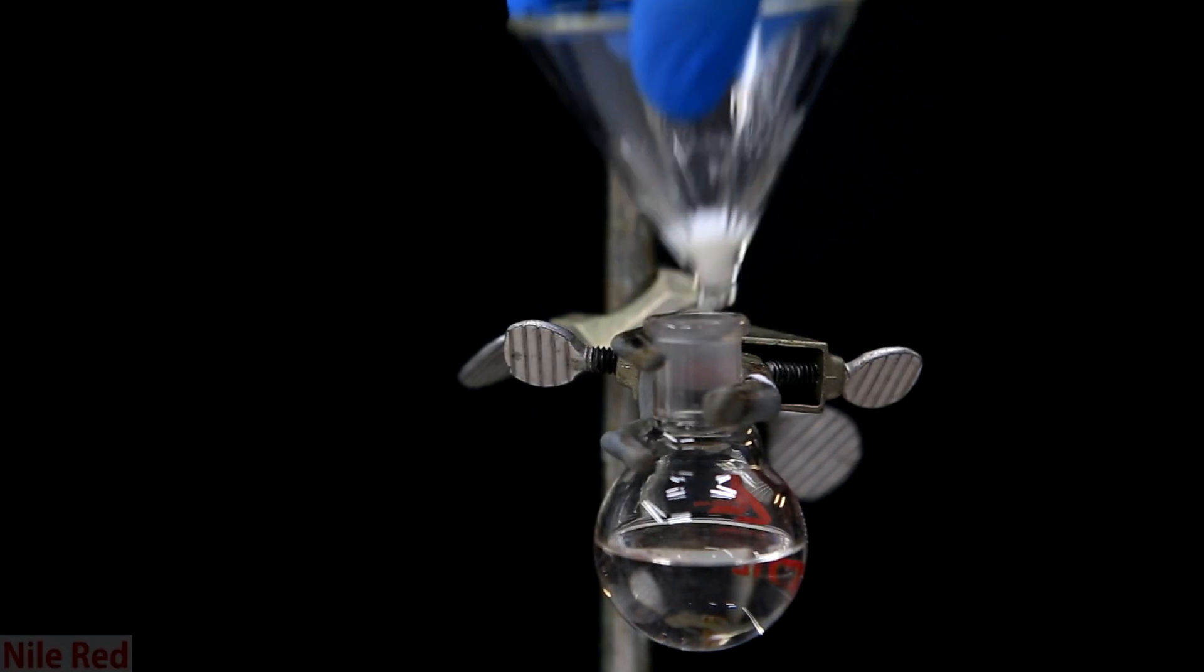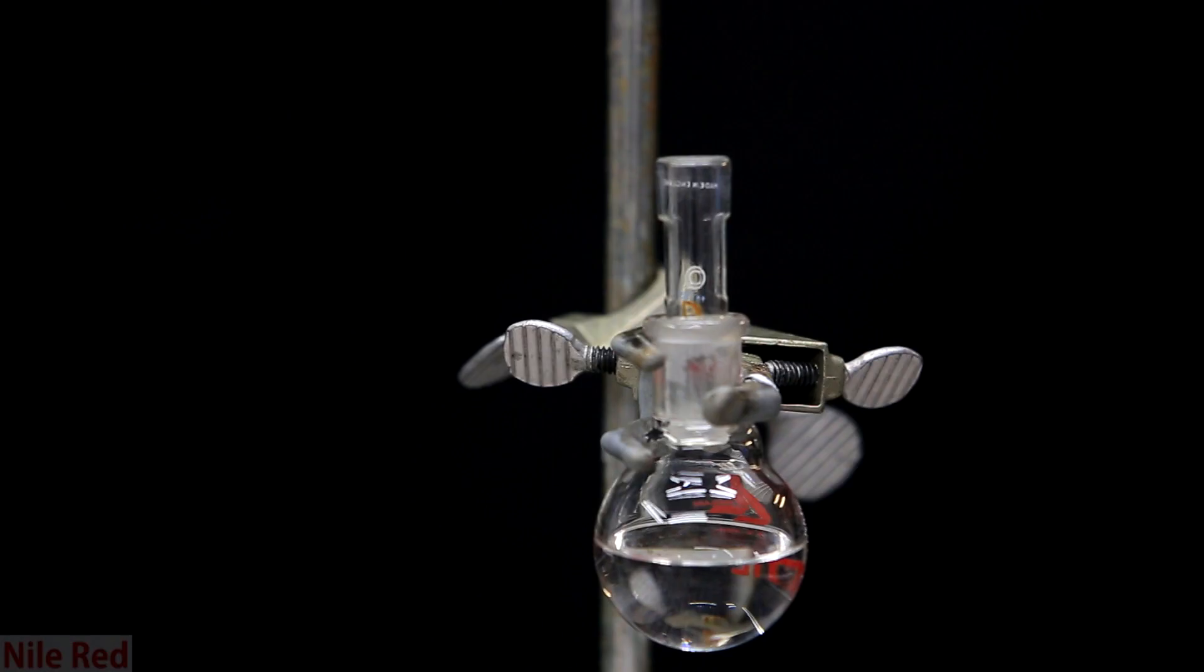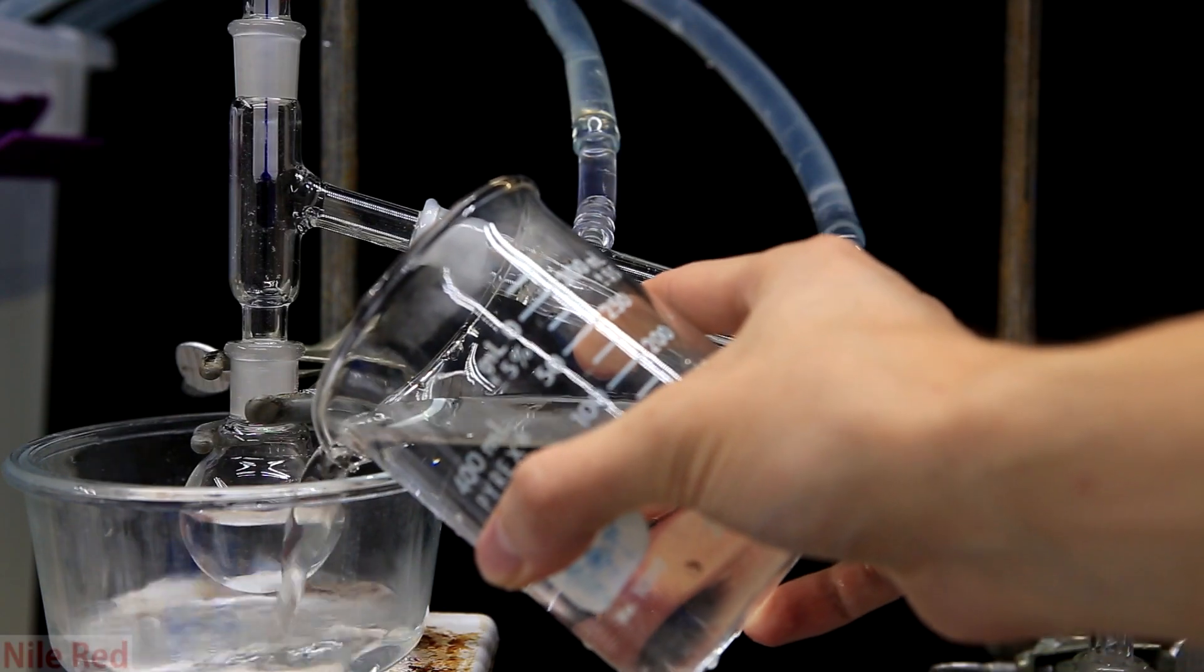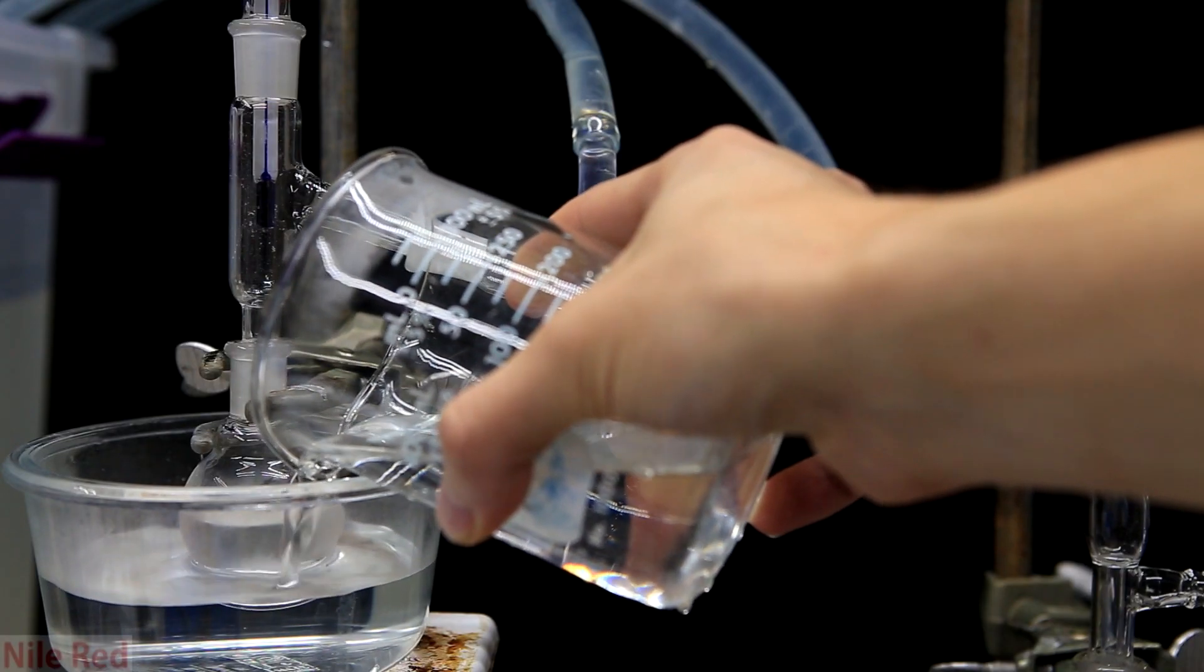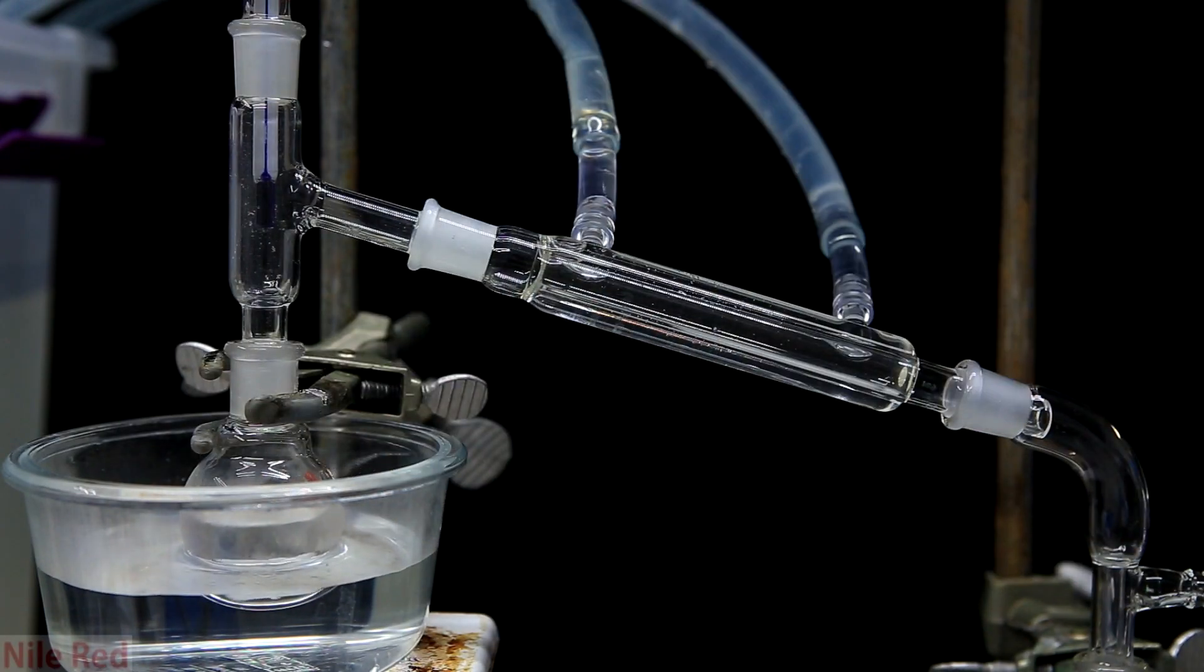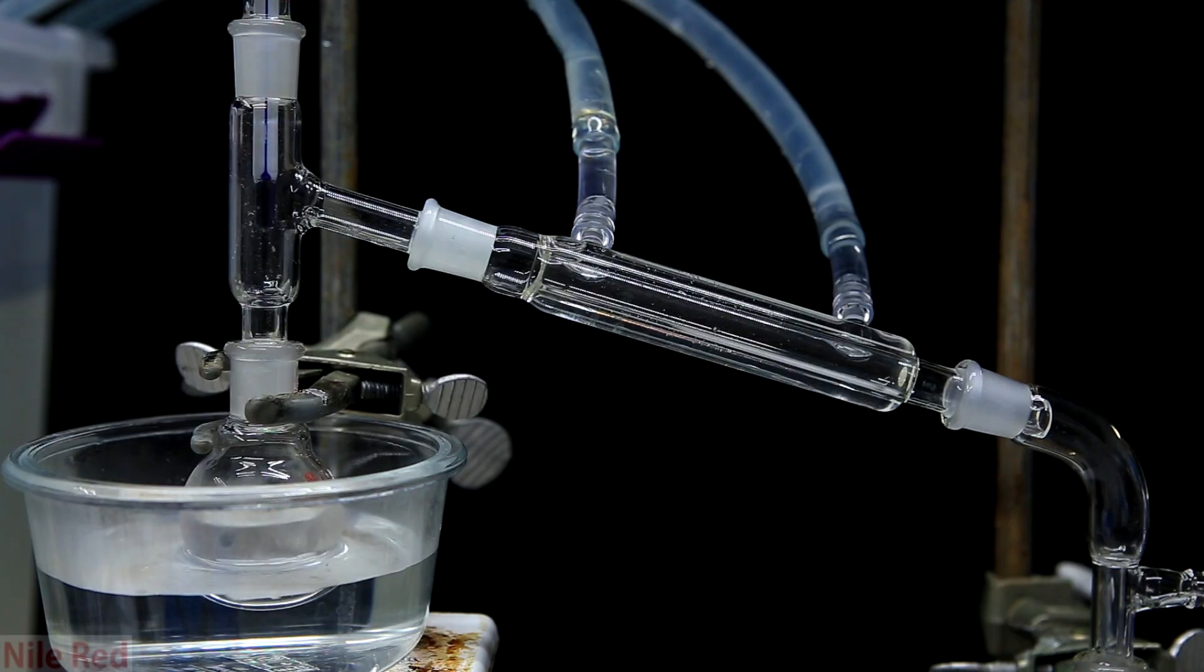Anyway now we should be left with just our product dissolved in diethyl ether. So the next step is pretty simple and it's just a matter of distilling off the ether. I use the distillation setup because it's kind of dangerous to evaporate ether into a closed room.